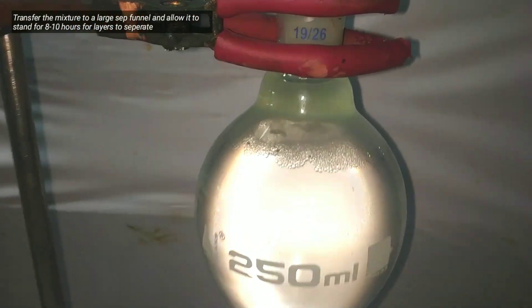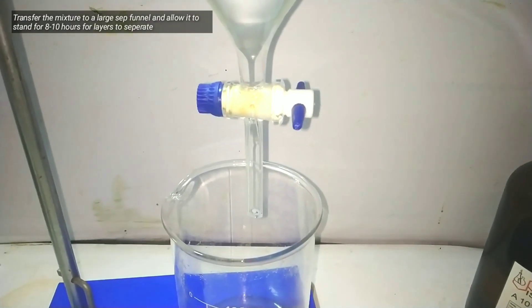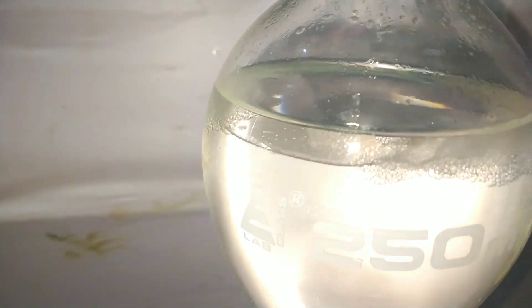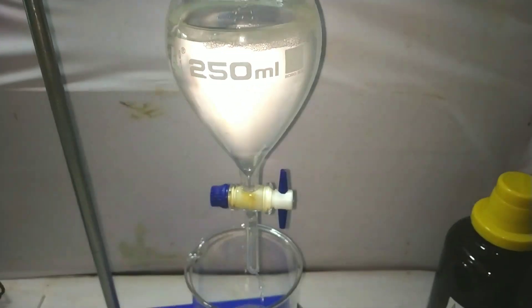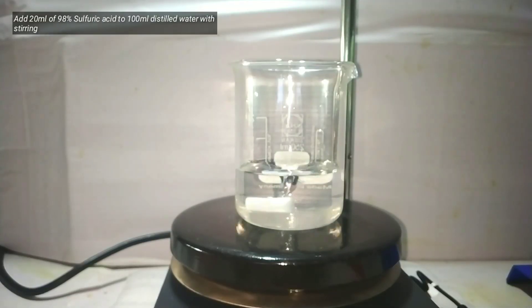Once the hypochlorite is added completely, pour the mixture into a separatory funnel and let it stand overnight so that the two layers separate. Here you can clearly see the two layers separated. The upper layer is the methyl ethyl ketazine and the lower aqueous layer can be discarded.